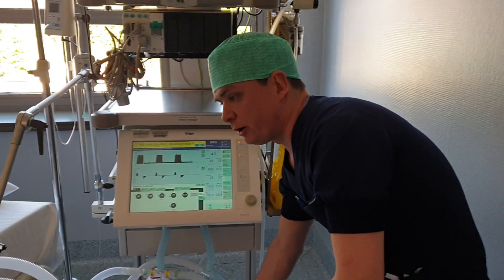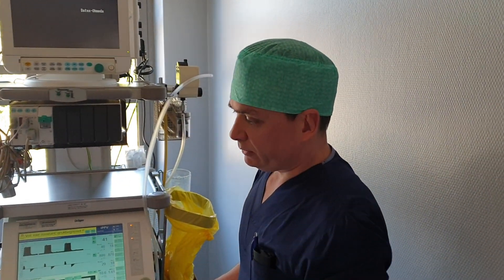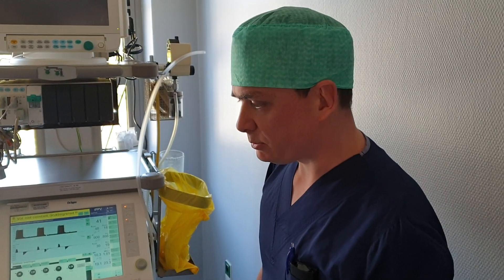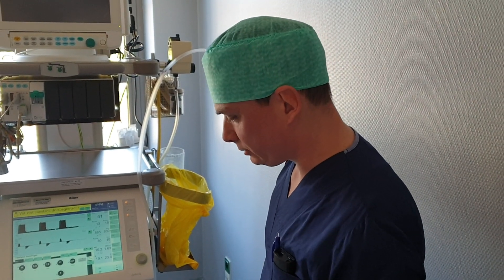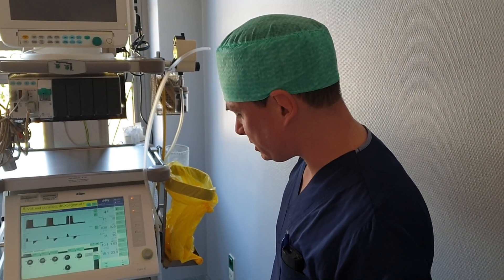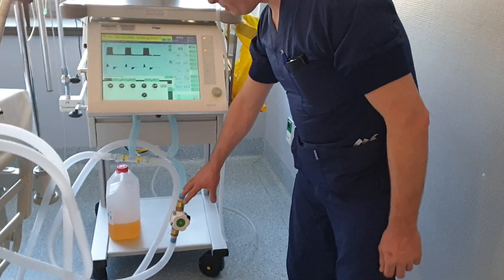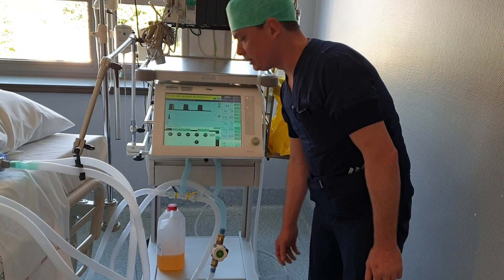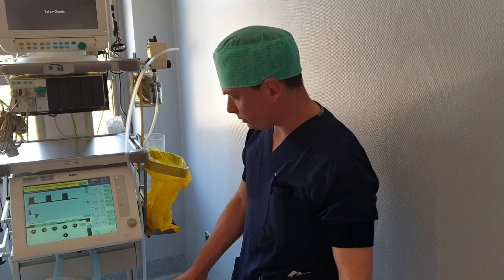It's a rough system, but I think this will do in desperate times — but I think not so desperate a measure. This is doable. Just buy some valves at the local do-it-yourself shop and you can get started.